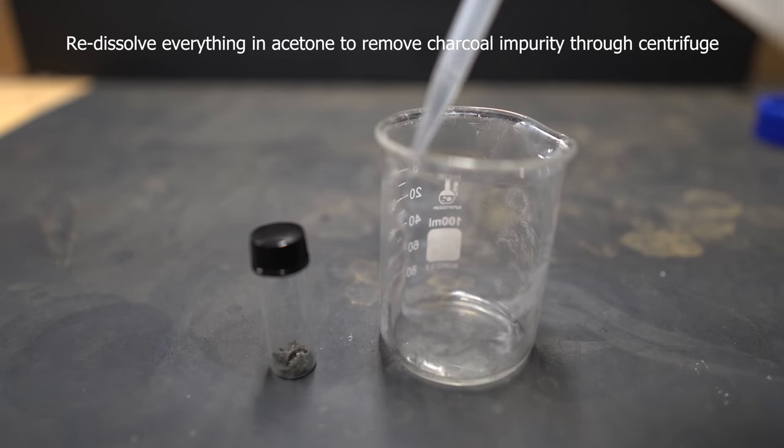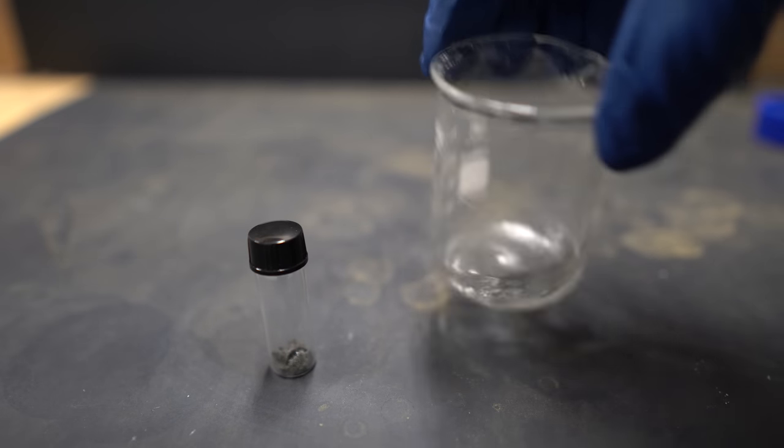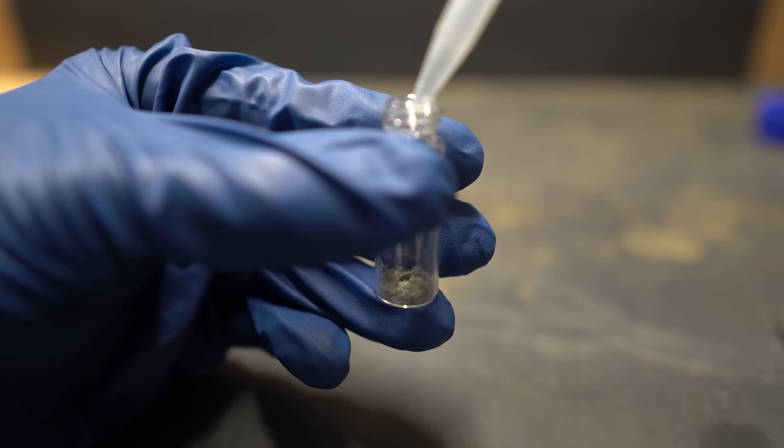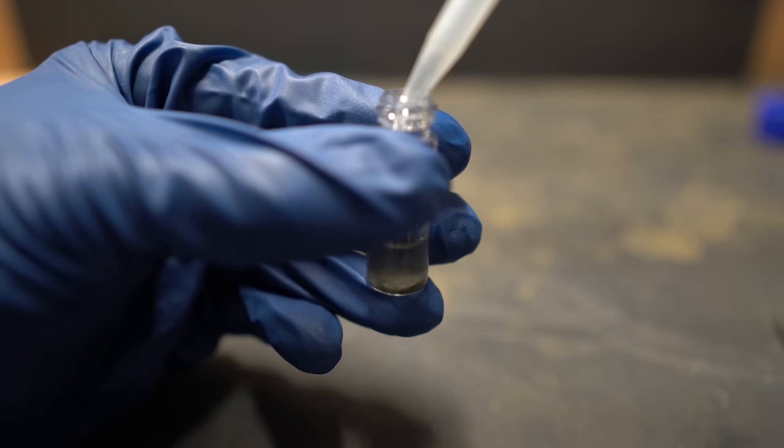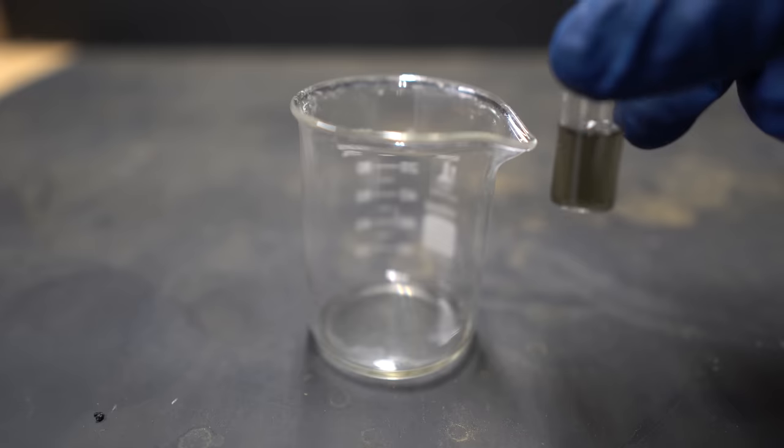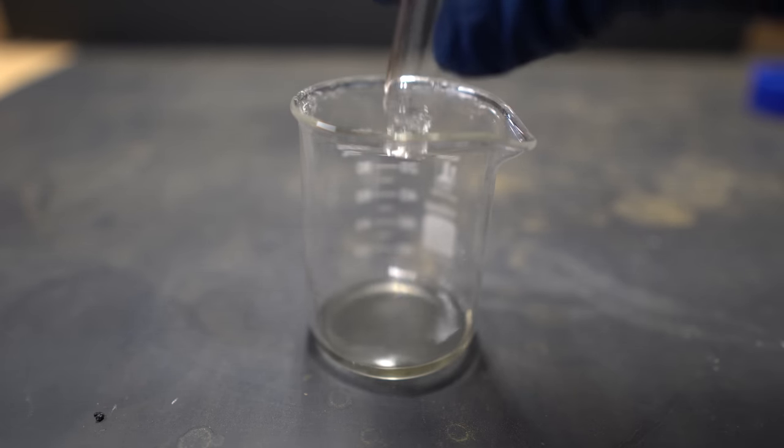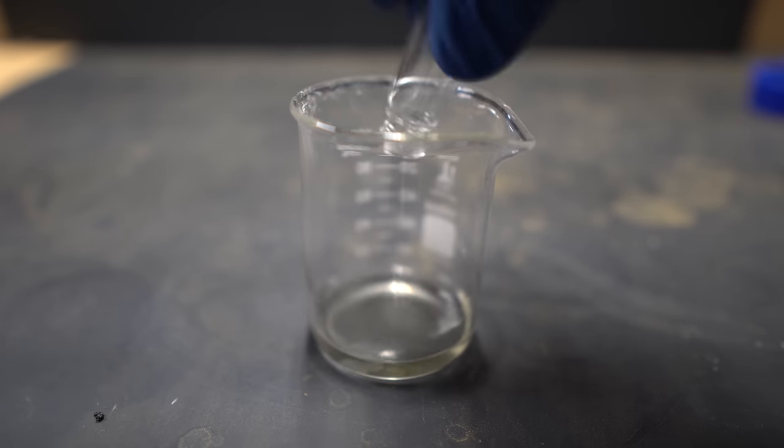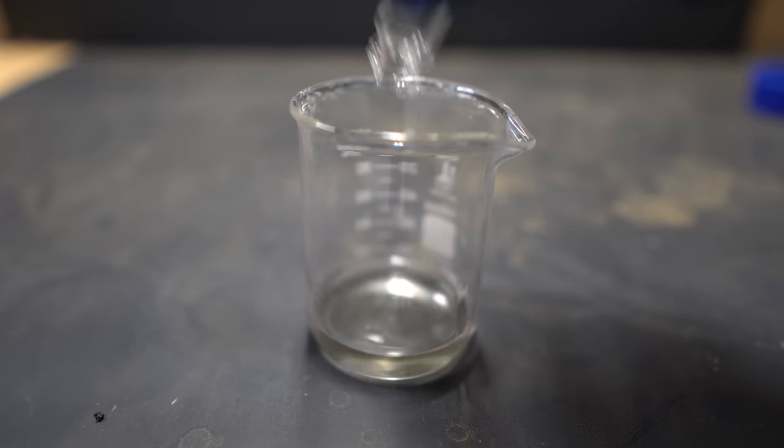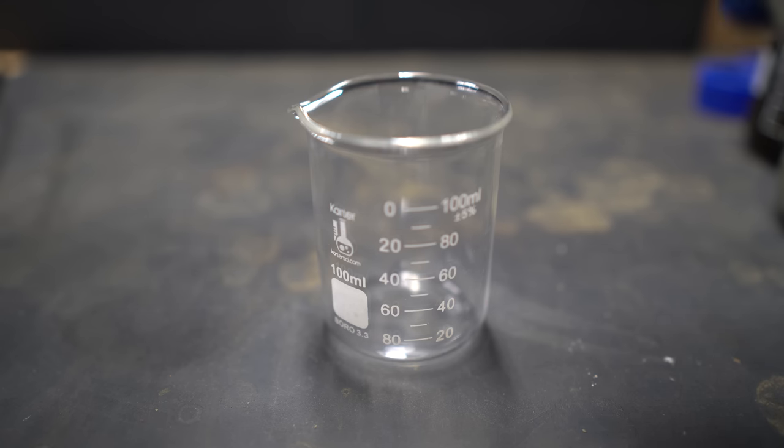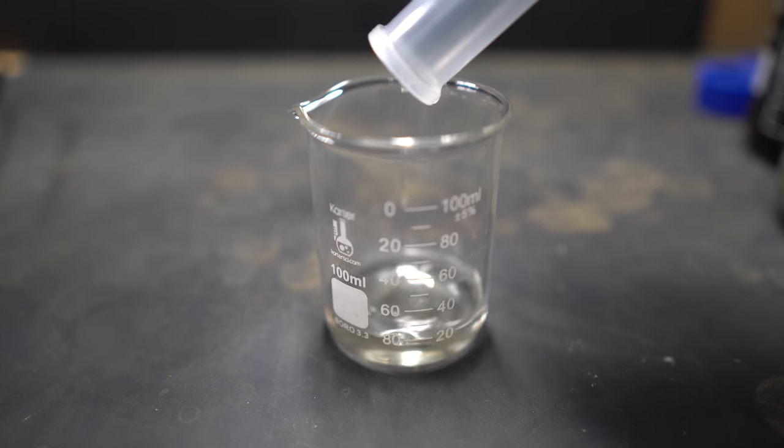I decided to redissolve everything and then we're going to centrifuge again and then recrystallize a second time with some brand new methanol. I made sure to wash the beaker that I used for recrystallization where all the crystals touched and I decided to redissolve all the crystals into acetone again. This way I could dump everything into a tube, centrifuge, pour out the solution, fan evaporate again, and then recrystallize. The interesting part is the crystals actually took a little bit longer to dissolve than the crude product.